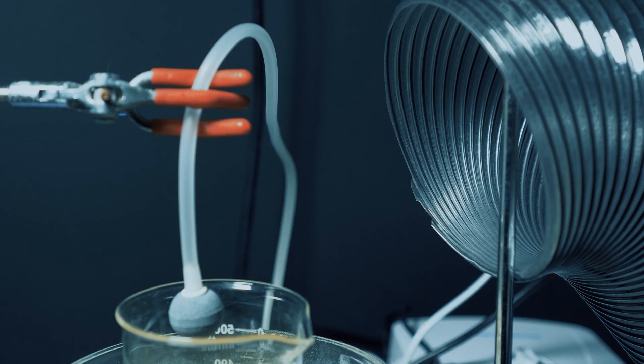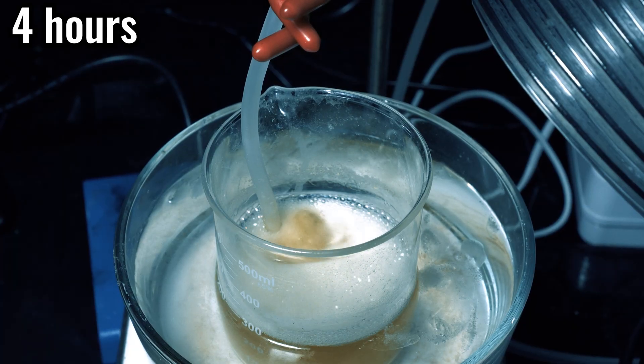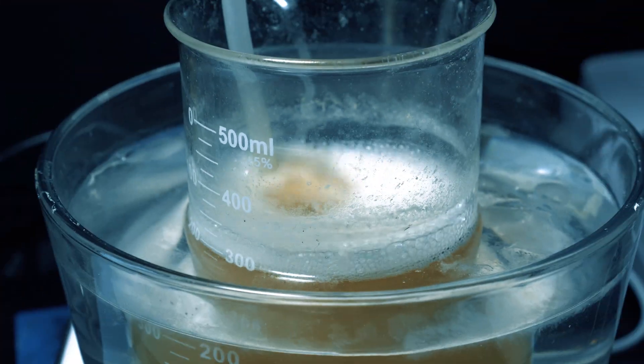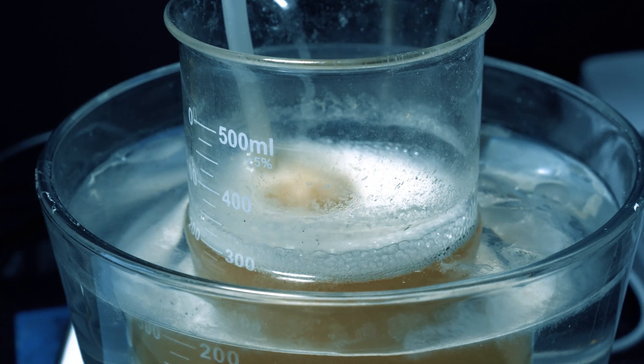And because we're using ozone, I have ventilation. Once I turned the machine on, it started bubbling and our ozonolysis started to happen. I originally put this on for 4 hours, as I thought this is a 1 to 1 mole ratio. Though, if you've already caught on, this isn't the best idea, and I'll explain why in a little bit.